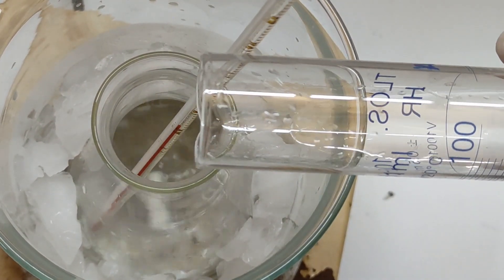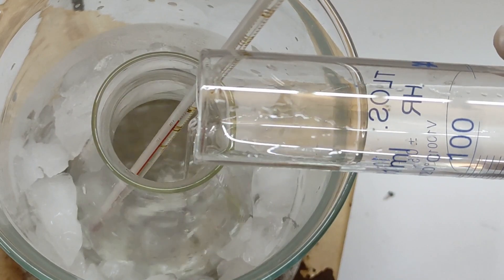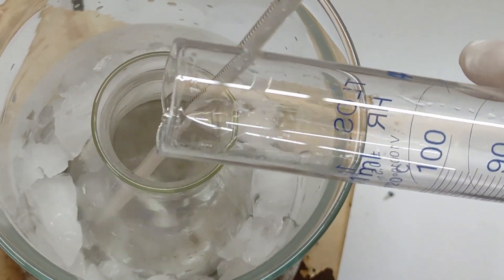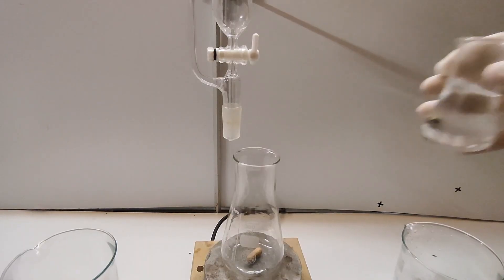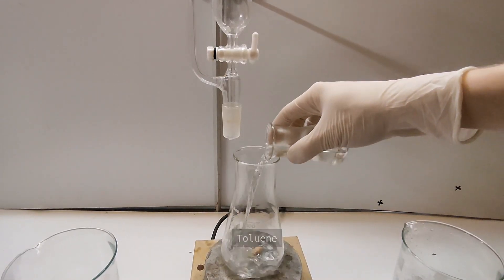We begin by adding our sulfuric acid to our nitric acid. This is done in an ice bath. It is important to keep the reaction cool as this prevents formation of dinitrotoluene.